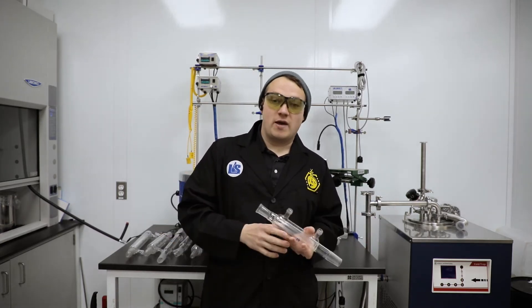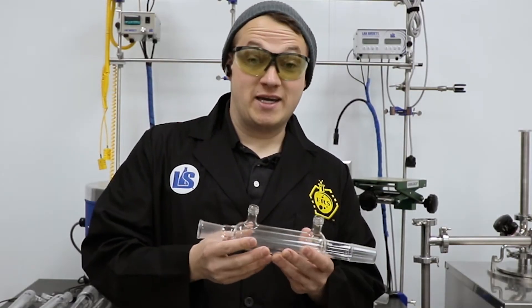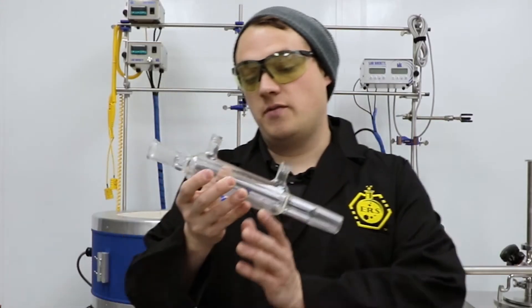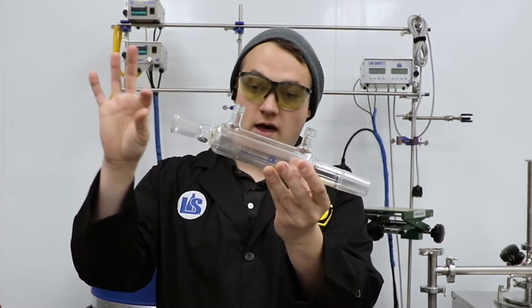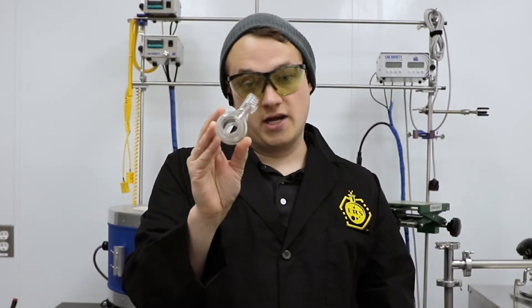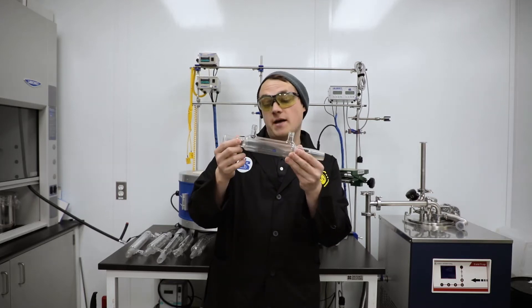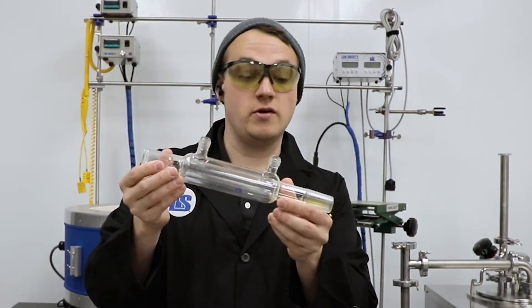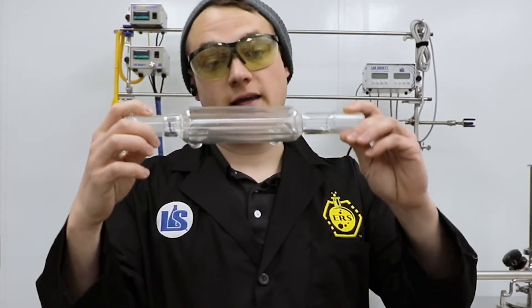We used to use these quite often in the beginning days of benchtop distillation. Everybody knows bucket tech, water pump, and water — you can really do it a hundred different ways. The benefit of a Liebig condenser is that there's really not a lot of holdup. It's got a free flow path so you really don't have to deal with clogging. You can get very large diameters for different types of viscous materials, but the main disadvantage of a Liebig is that there's not a whole lot of surface area — it's just the surface of the tube, basically the surface area of a cylinder times the length.